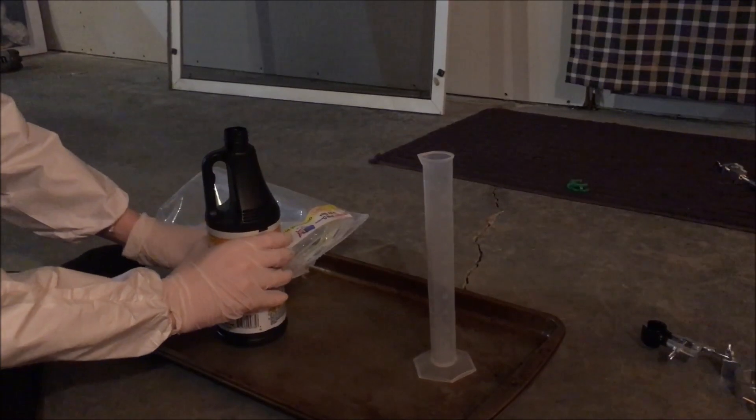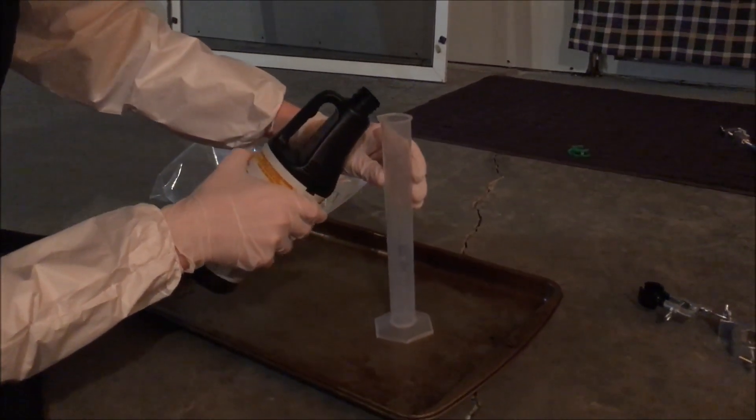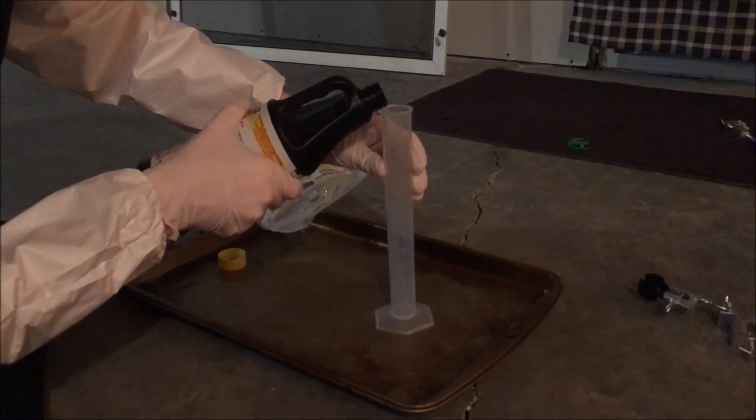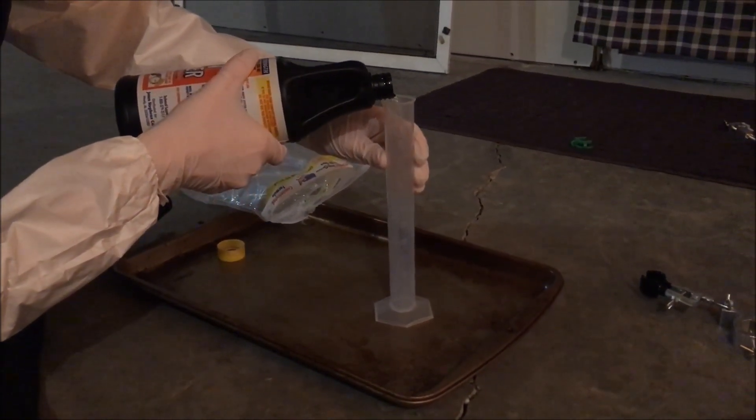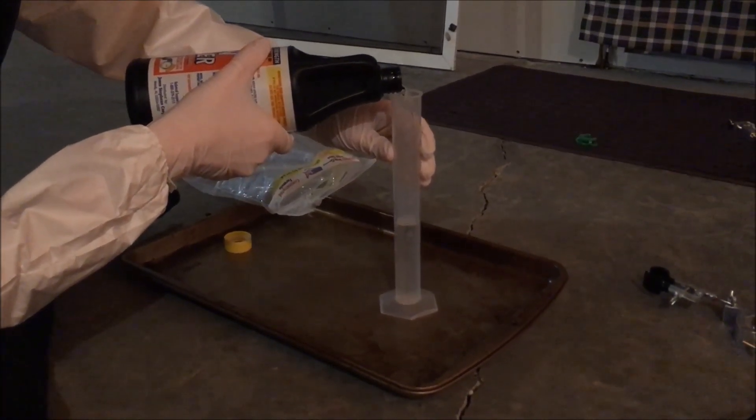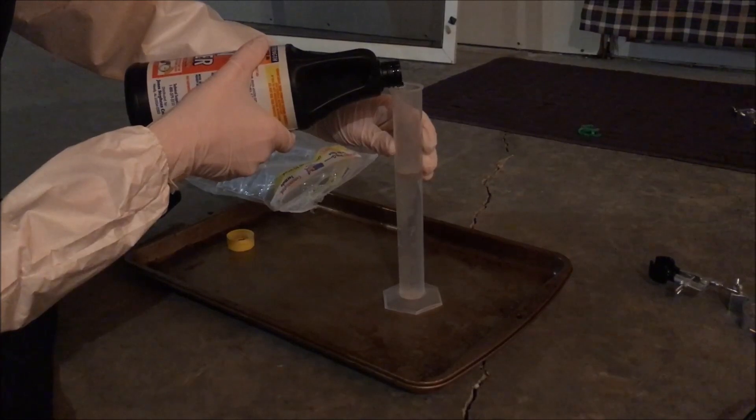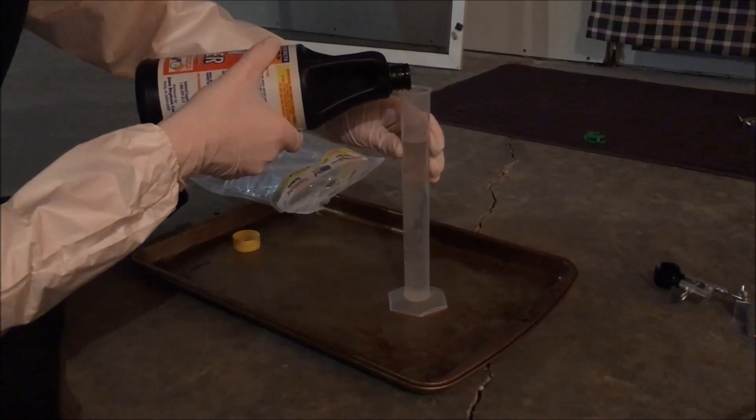The other ingredient for this reaction is sulfuric acid. I measured out 180 milliliters of 94% sulfuric acid found in drain cleaner. You can use better sulfuric acid and potassium nitrate, and you may get a better yield and purity of your final product.